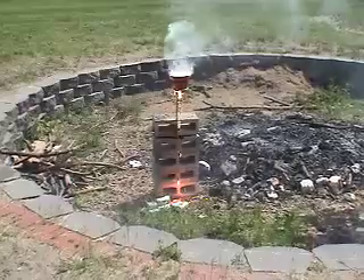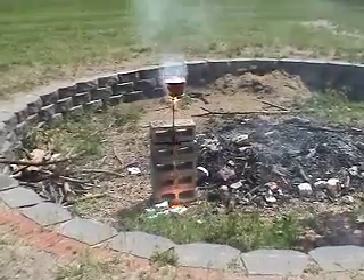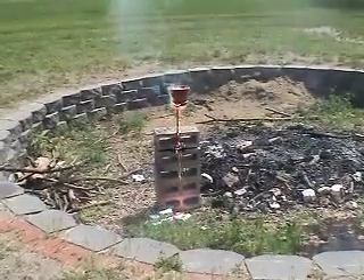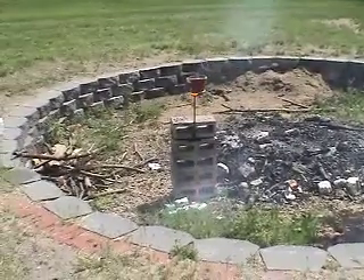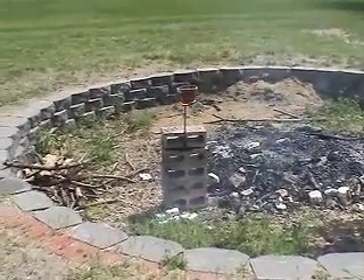There's some more iron. Molten iron dripping down. There we go. There's one — a few of our last gasps. Still going. And that is Thermite.